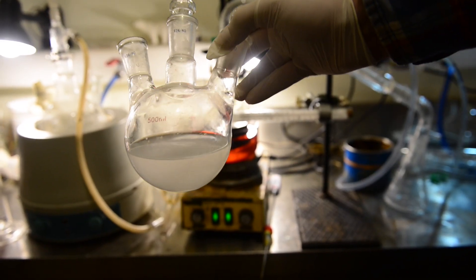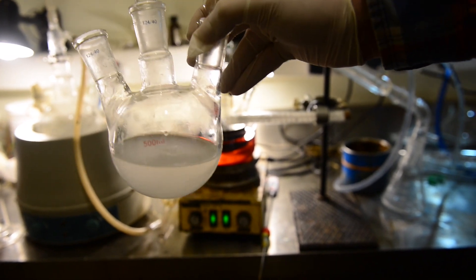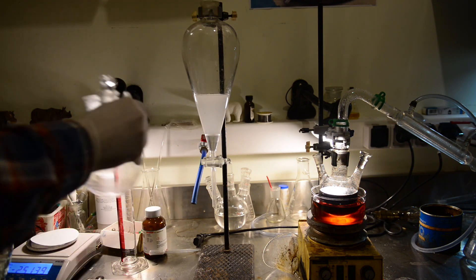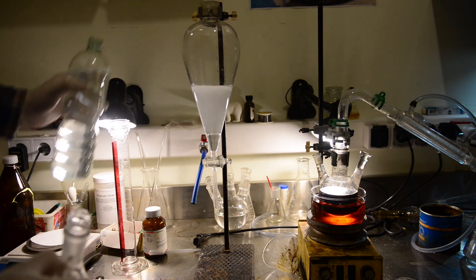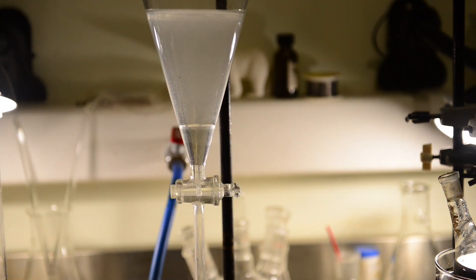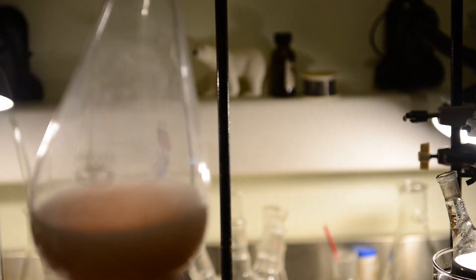We are going to purify the crude product obtained. We place the distillate in the 1 liter separatory funnel and add distilled water to dilute the distillate down and ease the separation of the product. We have decided to wash the whole distillate with 30 milliliters 10% sodium hydroxide to destroy side products. After washing, water in the funnel turns to dirty brownish color.